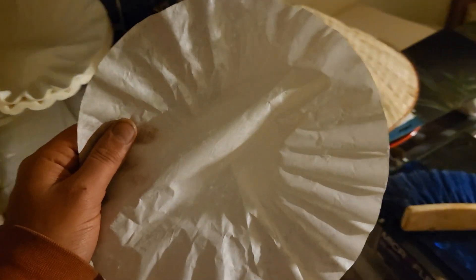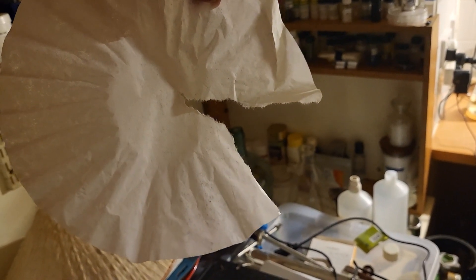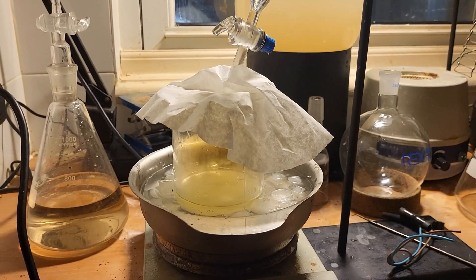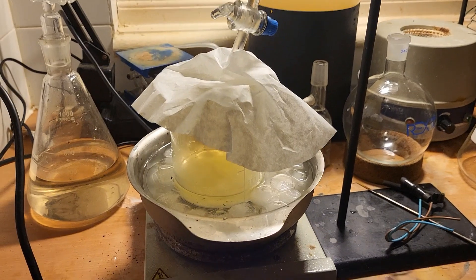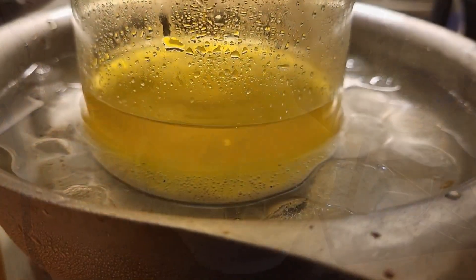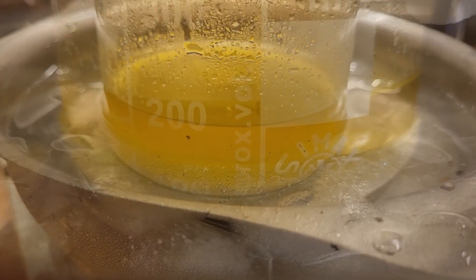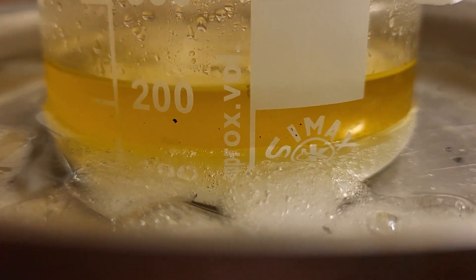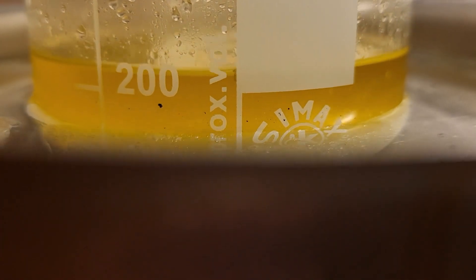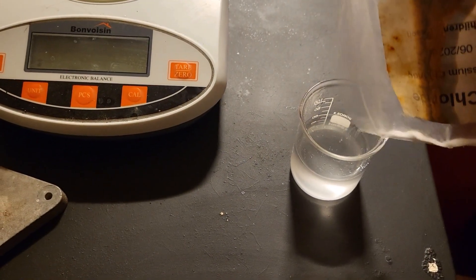A coffee filter, like this. And making saturated potassium chloride solution.